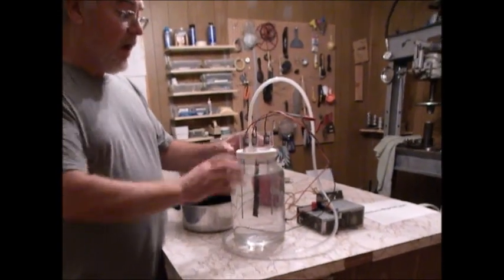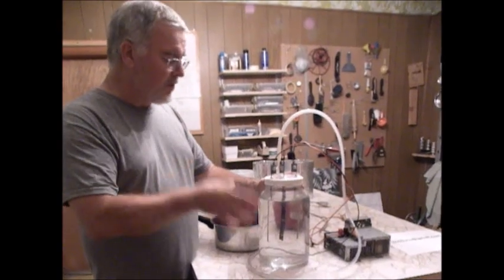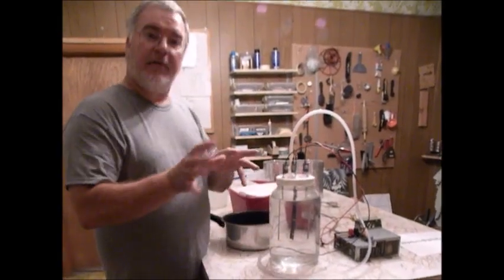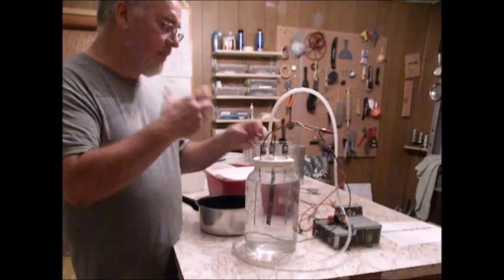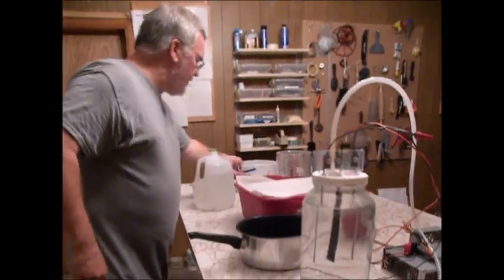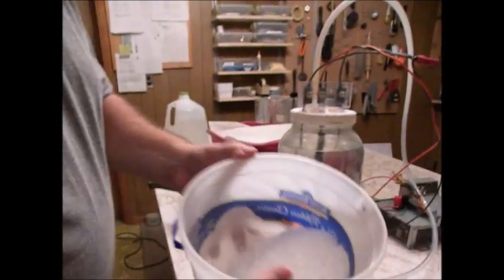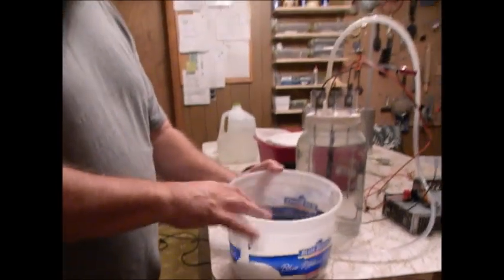So again, it lived up to all of my expectations. Worked great, relatively simple. I've tried to cover some things that I had to learn that I hope might help somebody else down the road. I was going to show you a couple other things. After it's purified, this is what we get - it's just a nice light flake. And at that point, depending upon what you're going to use it for, and this is completely done, I've ran it through the purification process, you can do with it what you want.